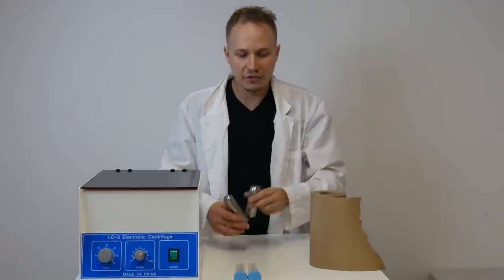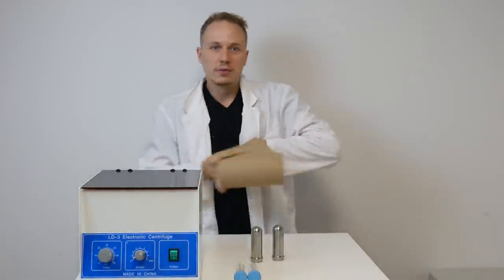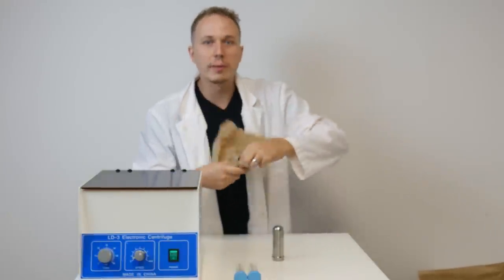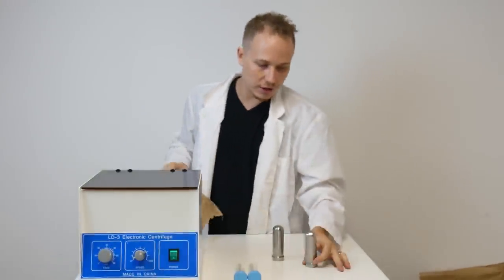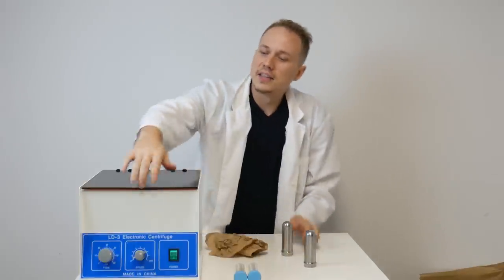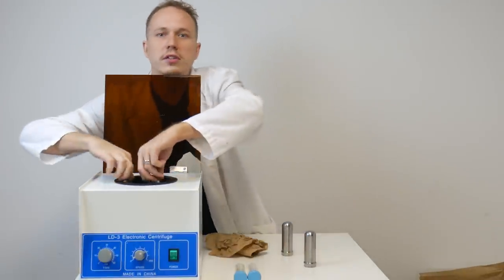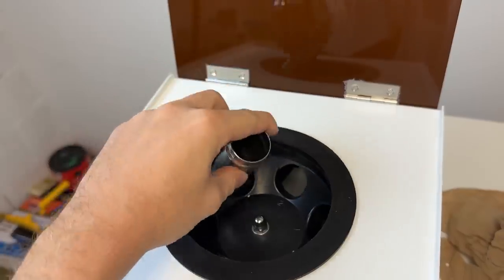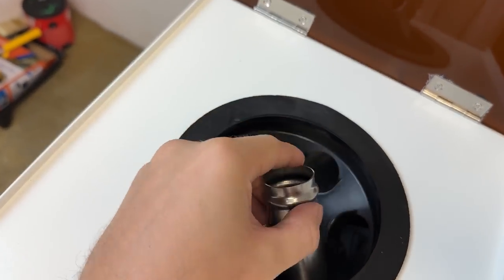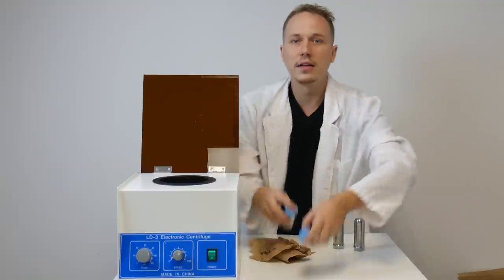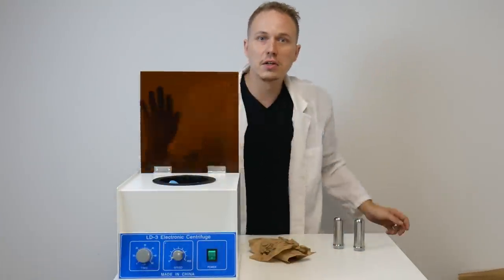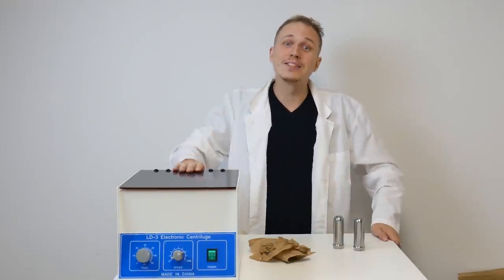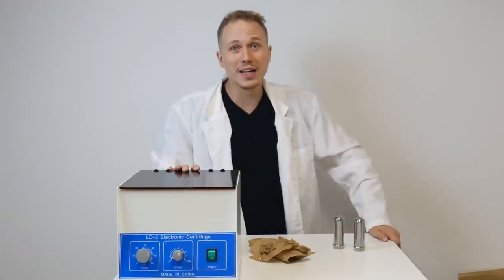Alright, after you've balanced your vials with your live resin, go ahead and take your chilled centrifuge tubes. I'm just going to give them a quick wipe down as there's some moisture from the freezer on them. Take out the old warm ones from the centrifuge. Make sure they are in a line and then just pop in your vials, close the lid and hit start. It's that easy to turn it on to load it up. It's a pretty nice way to separate your terps and your THCA.